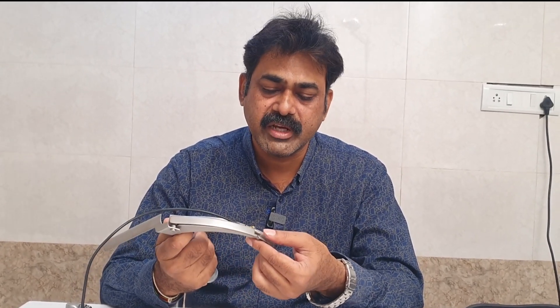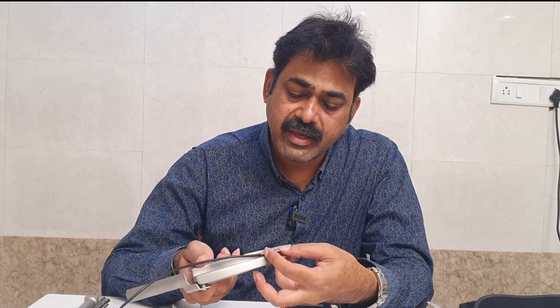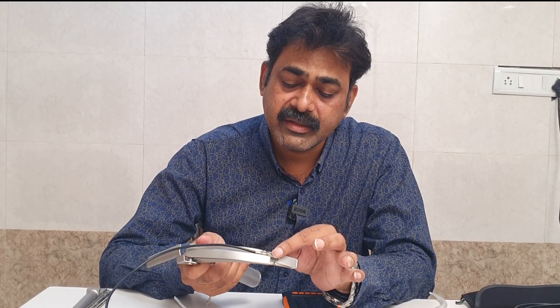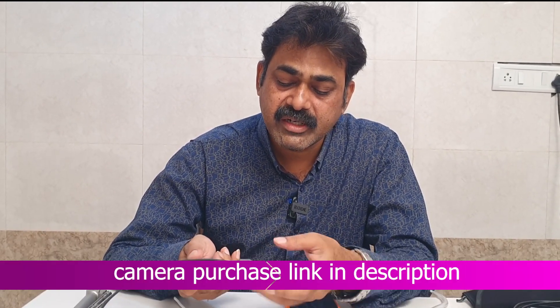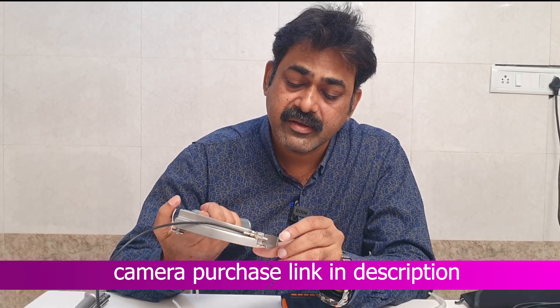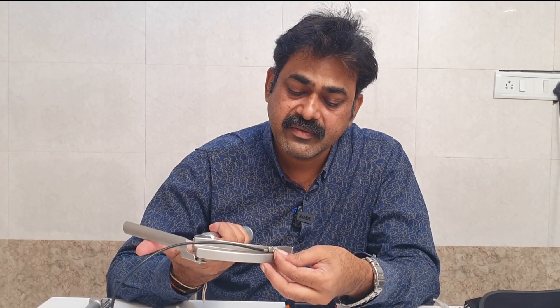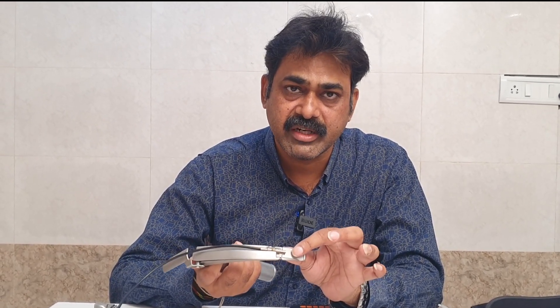I have done more than 20 cases with this device. I have fixed it here — this device has a 3.5mm scope and a 4mm steel tube soldered at the tip of the blade, as you can see. And it has a screw fixing so that the image orientation is stable all the time.